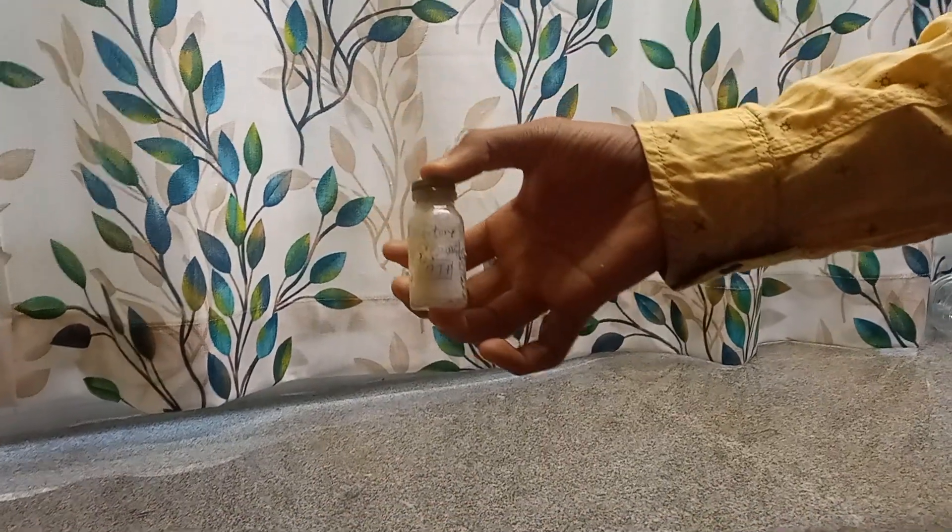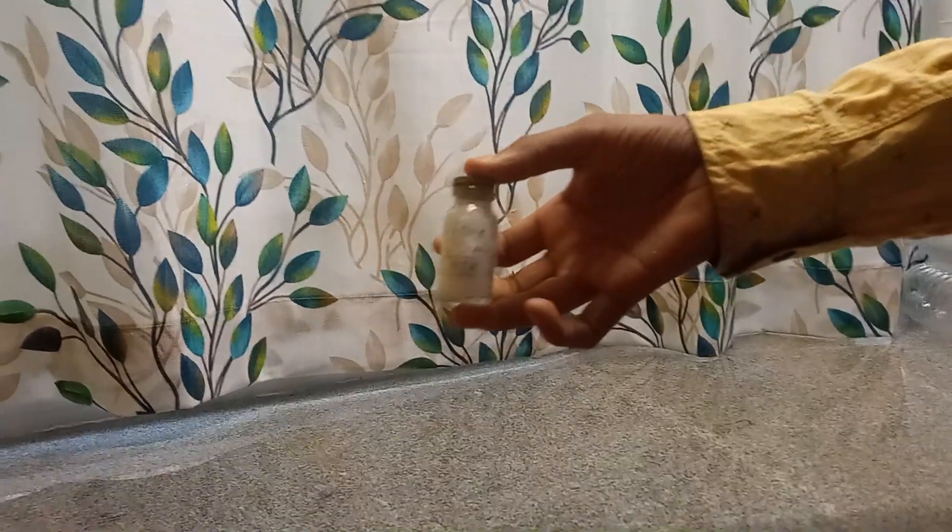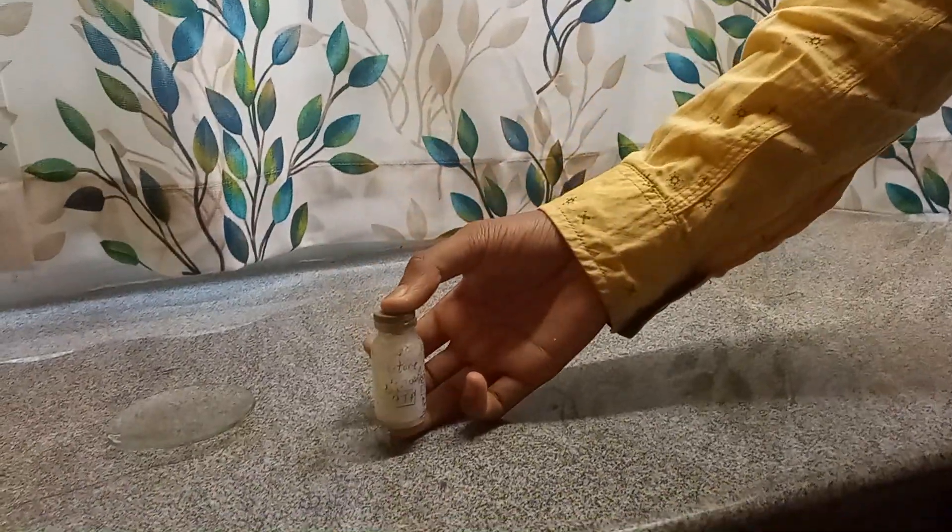This I have synthesized myself from some common laboratory chemicals. Stay tuned to know how to make this. This is very easy.